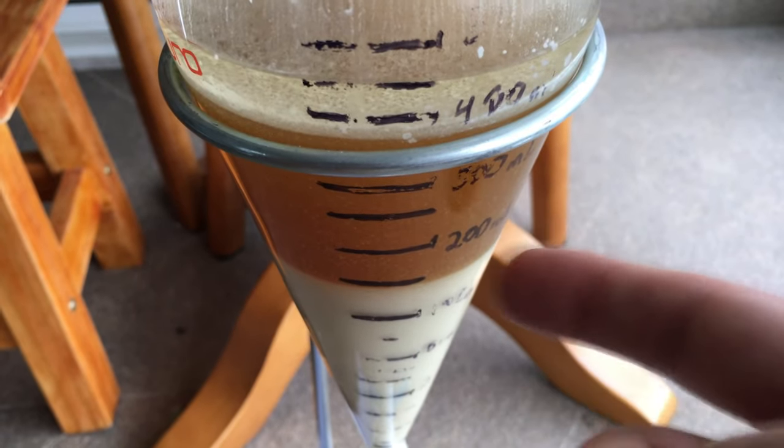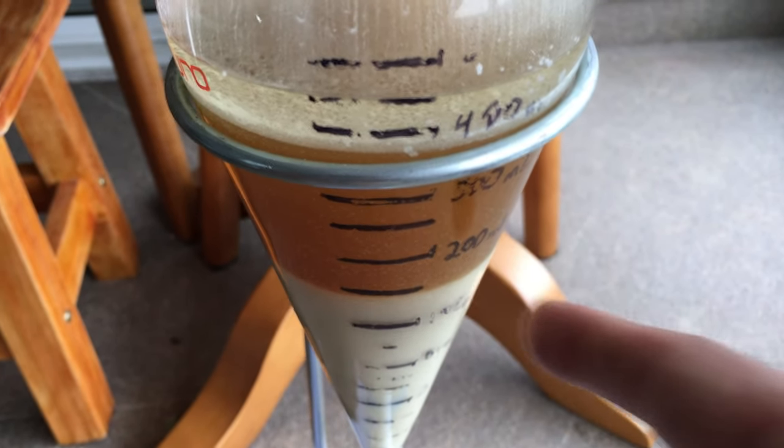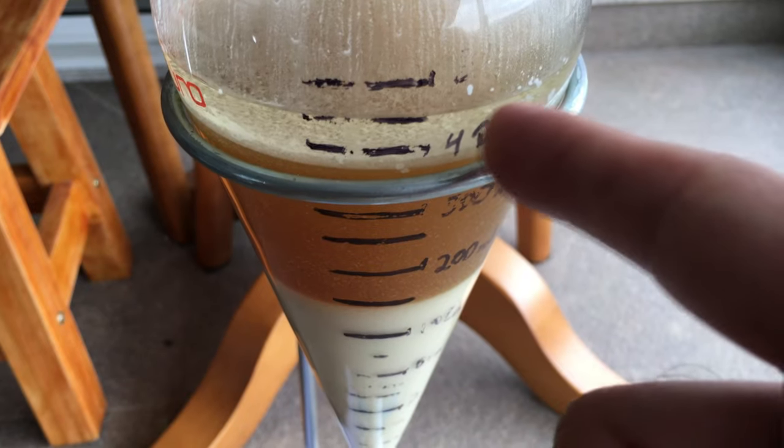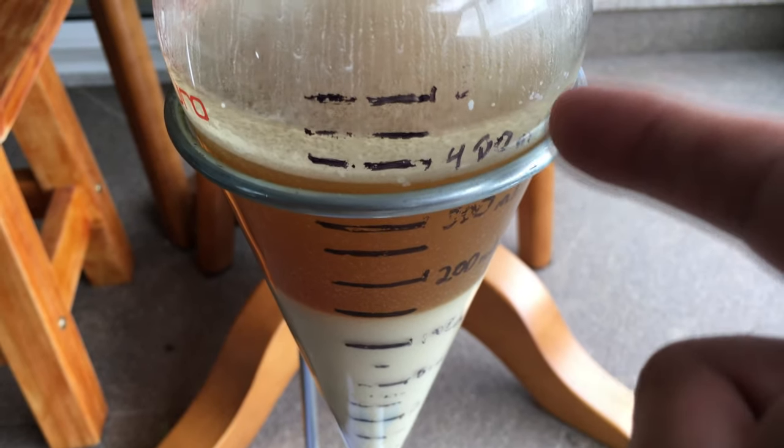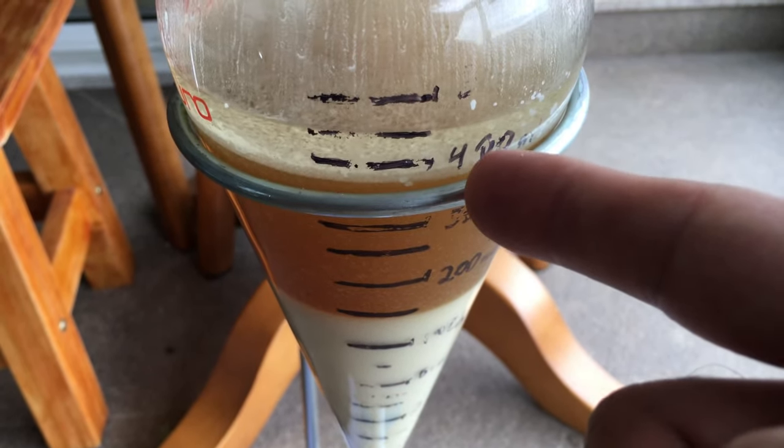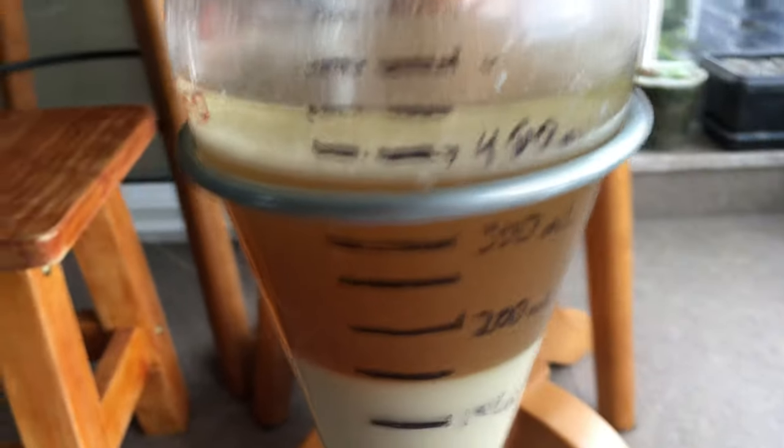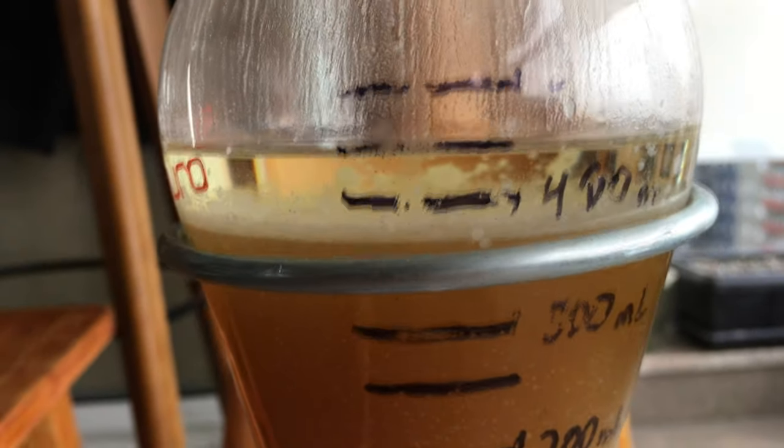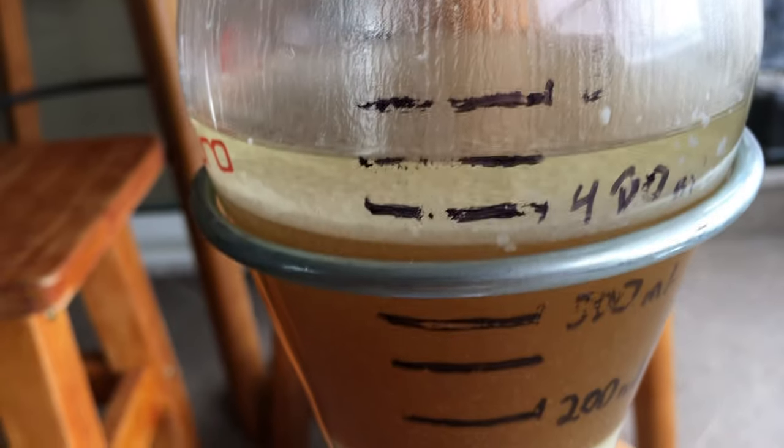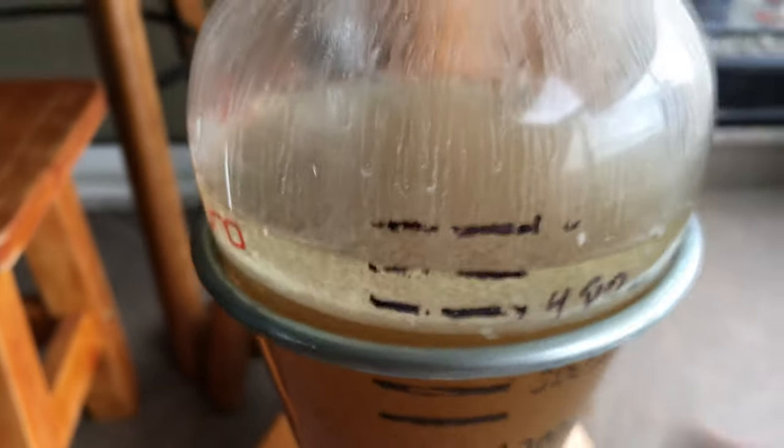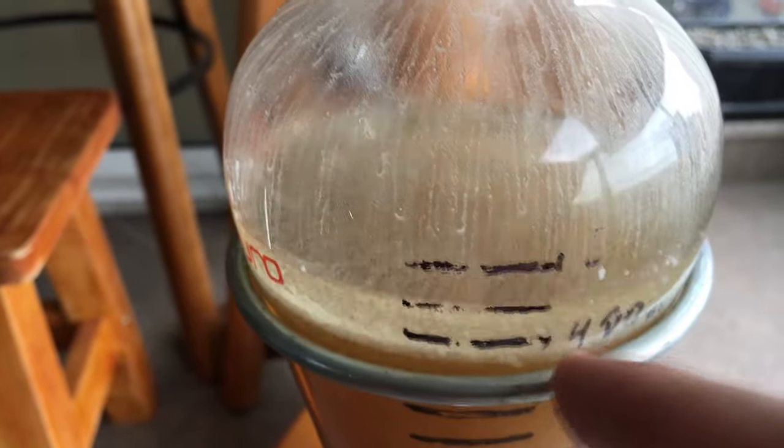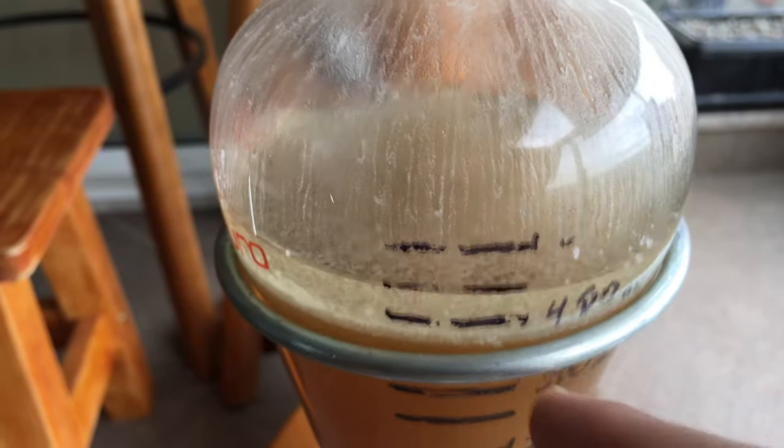I'm going to separate this and try to pull and salt the ethyl acetate. It's a very clear solution so far. There may be some annoying precipitates that stay between the aqueous and the organic layer, but I want to do the final pulse.